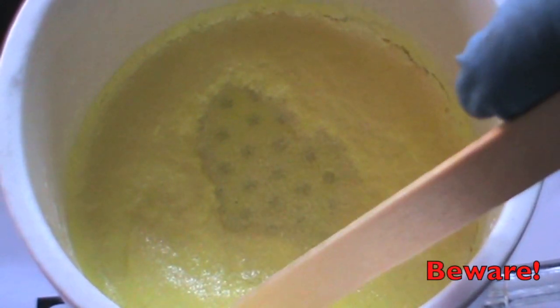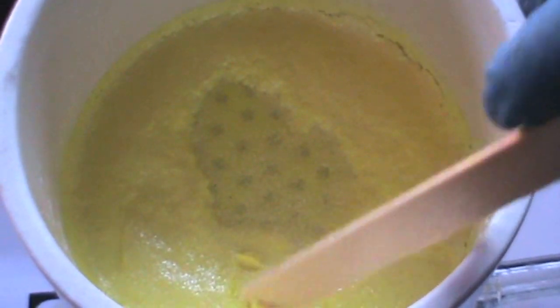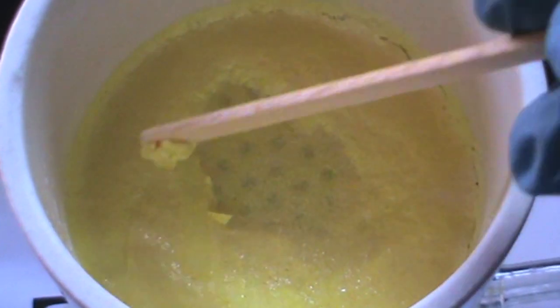Be aware to store the picric acid in a wet state in a glass amber bottle with a plastic lid. Do not store in a metal container as it could form shock-sensitive explosive metal picrates.